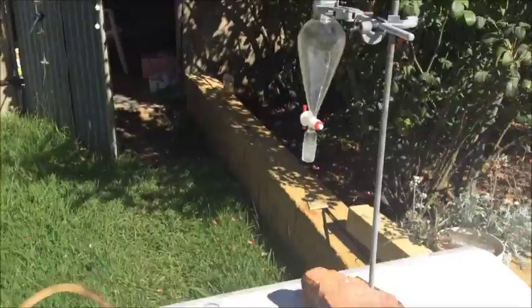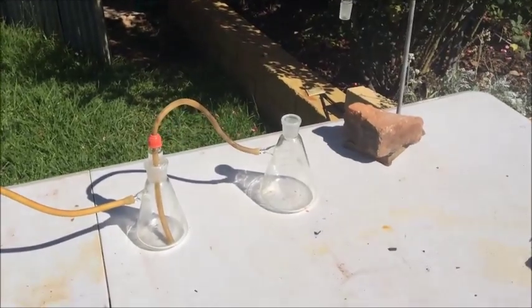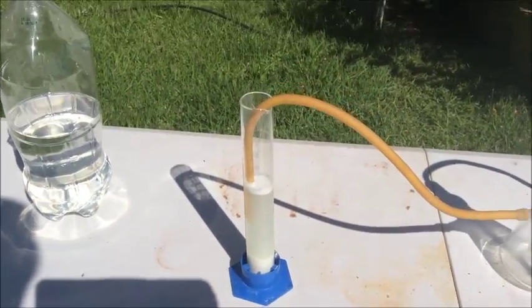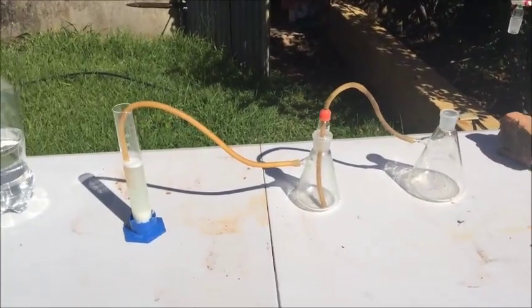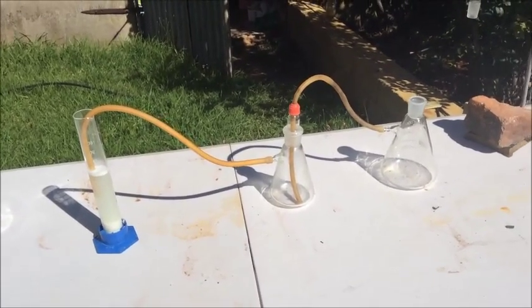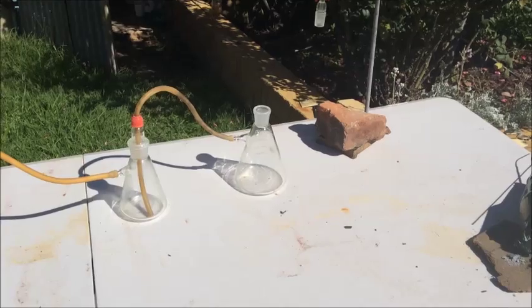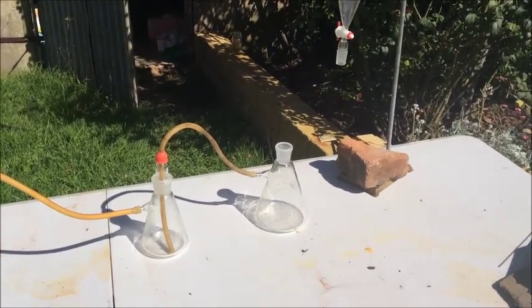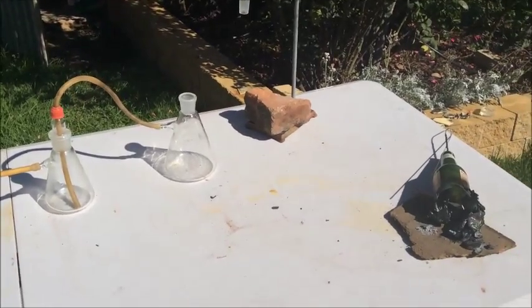We're going to use about 20–30% sulfuric acid because it's non-volatile — it'll drip down onto the sulfides and produce hydrogen sulfide, which will bubble through the sodium hydroxide solution and then out through a scrubber containing calcium hydroxide, so hopefully nothing escapes. Hydrogen sulfide, as well as being unpleasant, is also very toxic, so measures should be in place to limit your exposure. You should definitely not do this indoors.